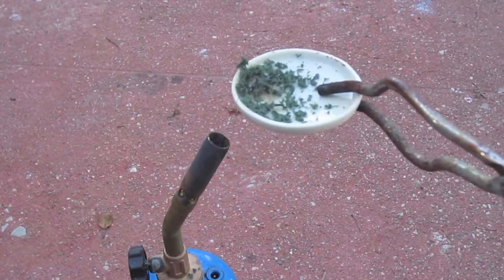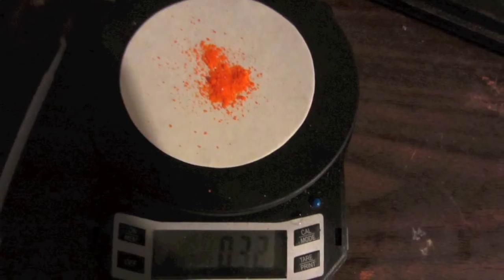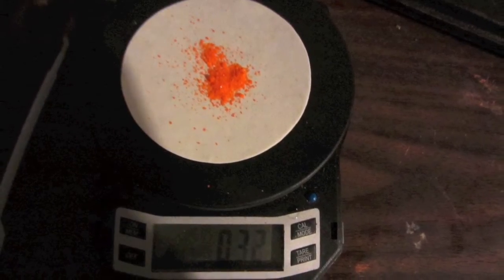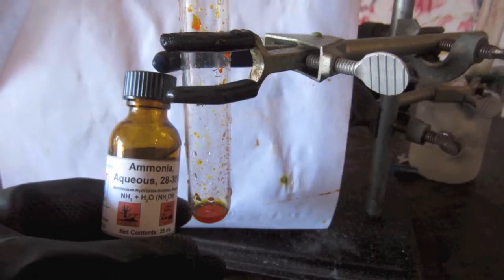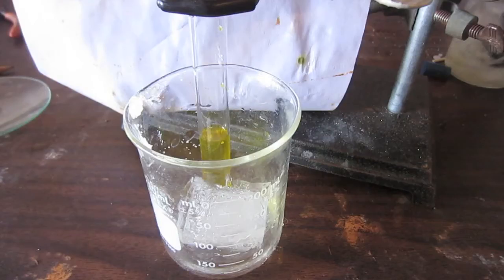So, to make this compound, get 0.3 grams of ammonium dichromate and dissolve it in as little concentrated ammonia as possible. I'm using 30%. You're going to need a surprisingly large amount of ammonia.